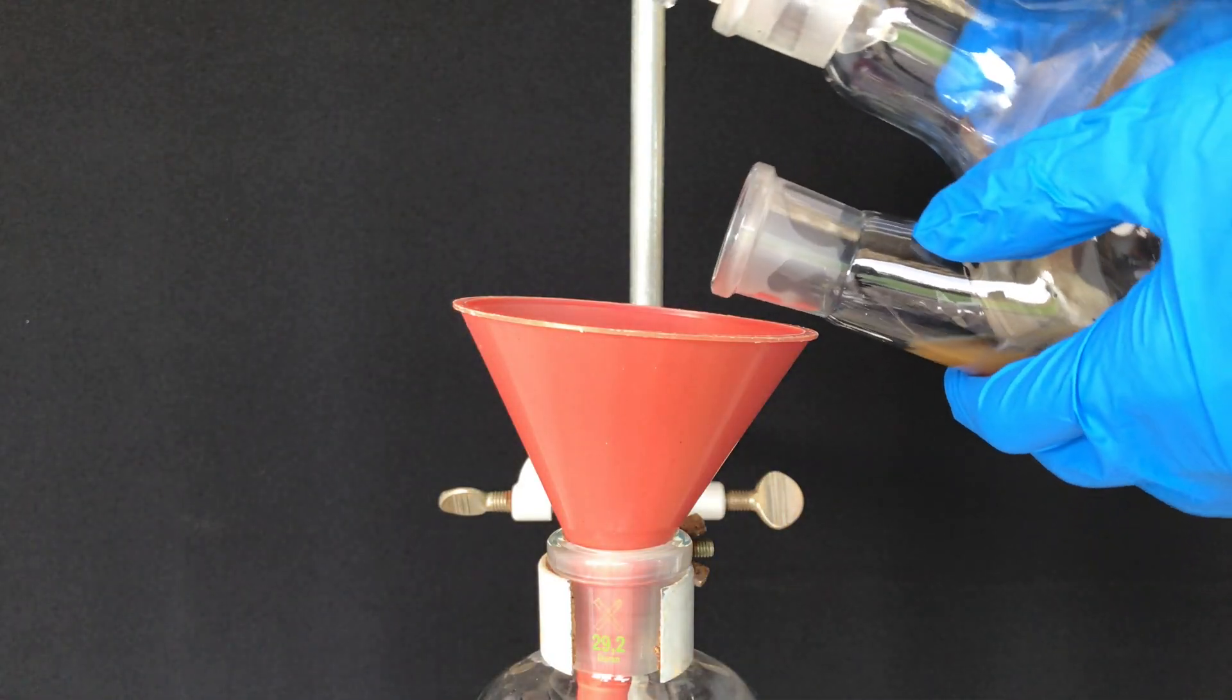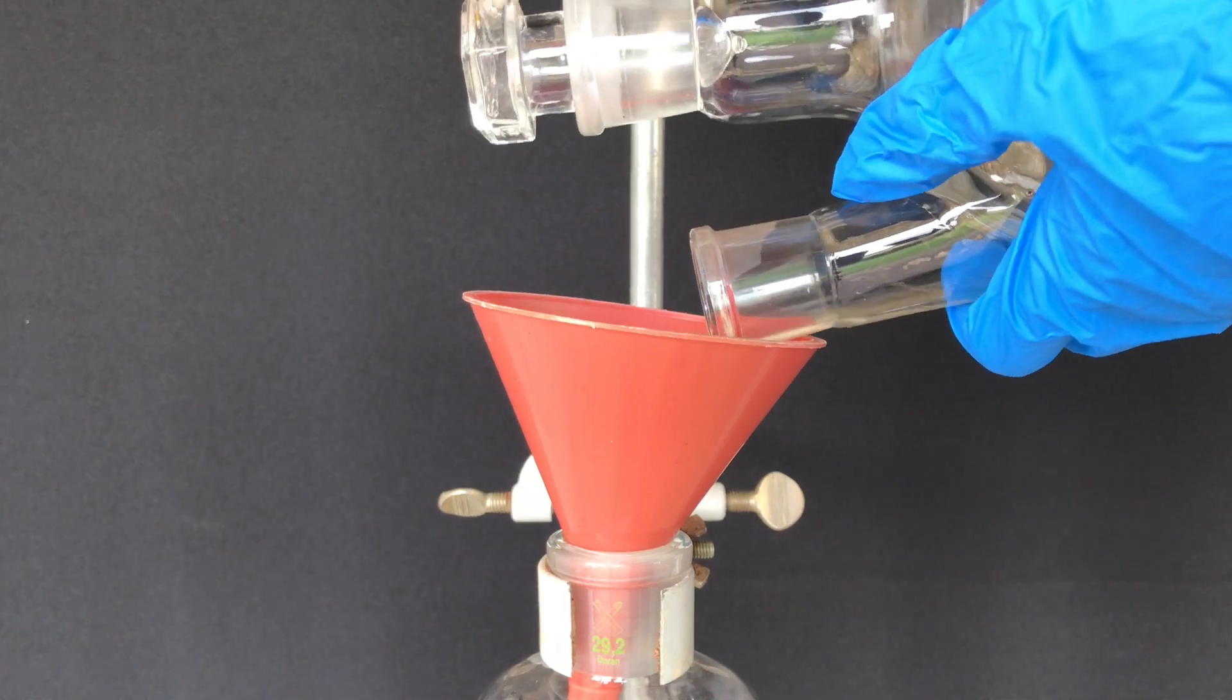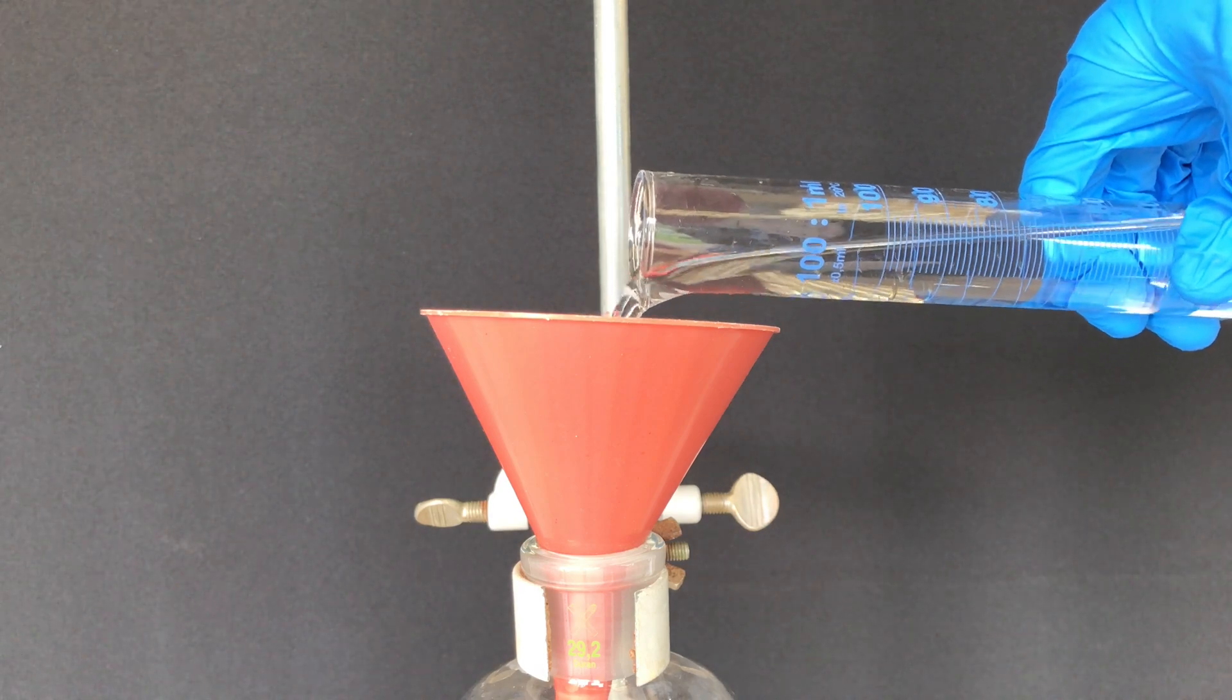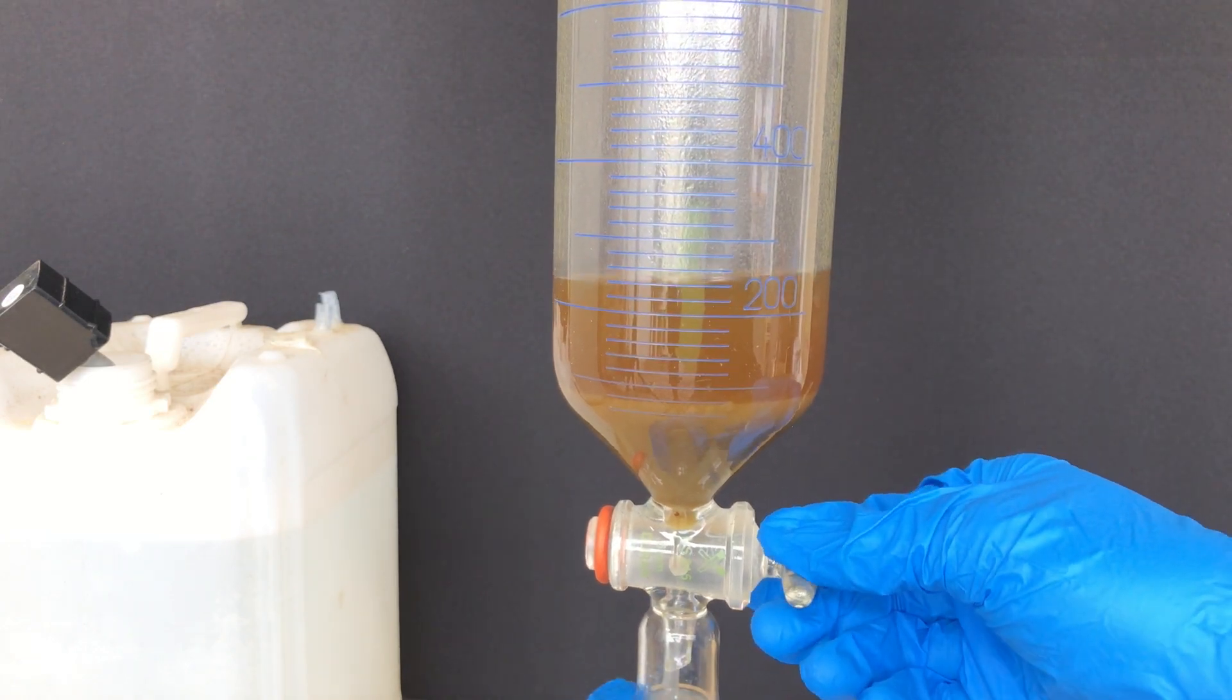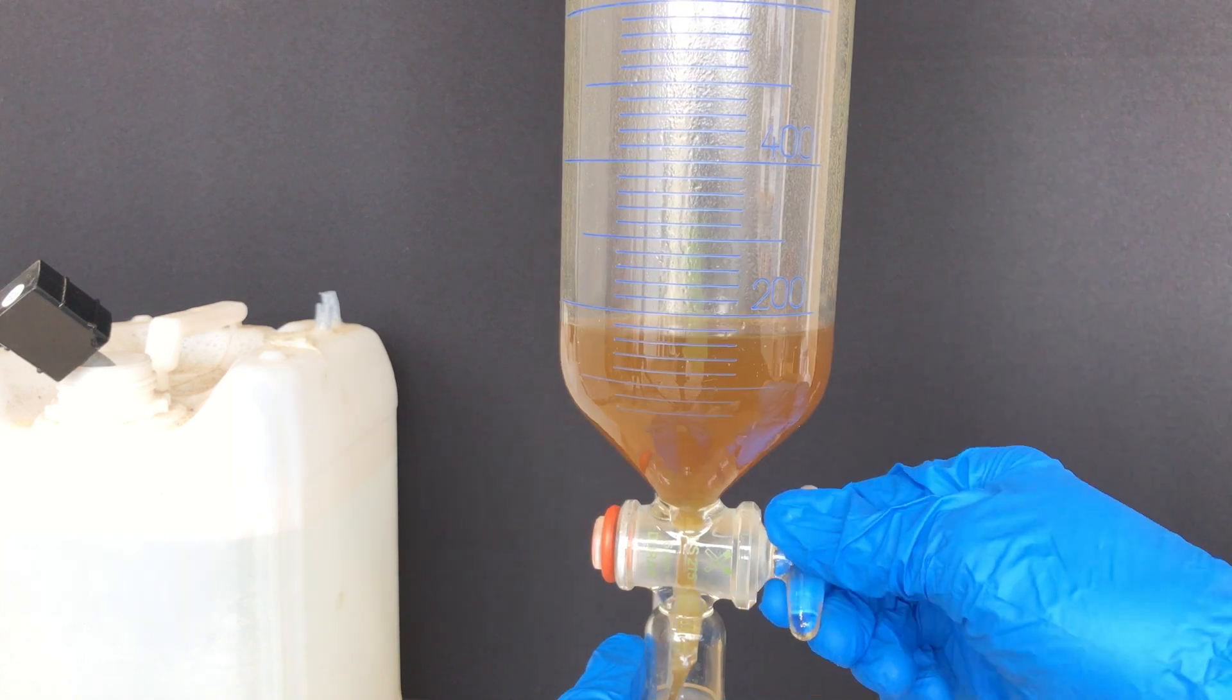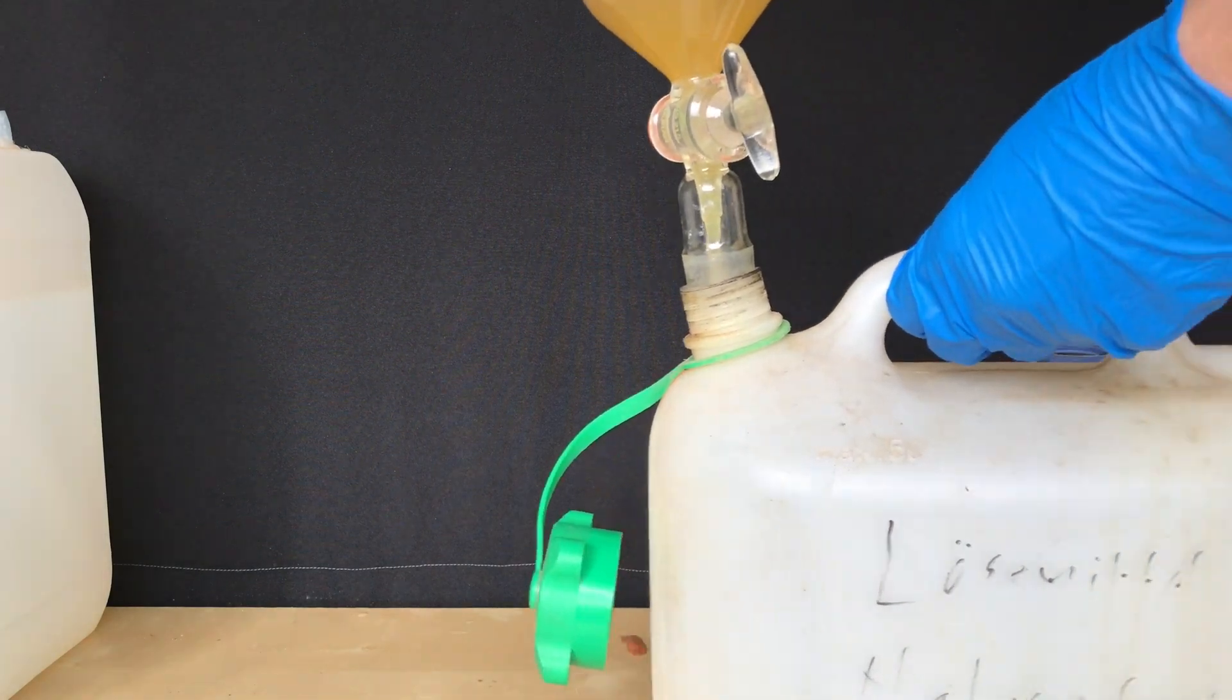For the next step the dirty looking solution was transferred to a separatory funnel. The flask was rinsed with about 30ml of the solvent which was previously distilled off. To get alkaloids out of the organic layer for further purification, about 150ml of 14% sulfuric acid were added. The alkaloids form water-soluble sulfuric acid salts which do not dissolve in the hexane-heptane mix. The funnel was shaken for about a minute and the bottom layer containing the product was drained into a flask. The top layer was discarded.